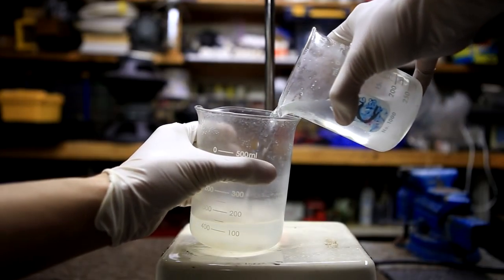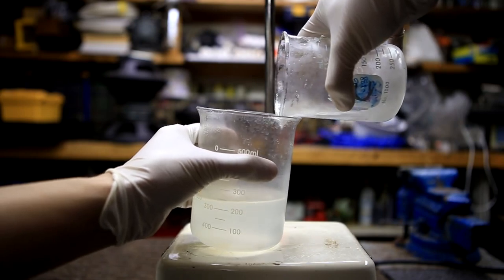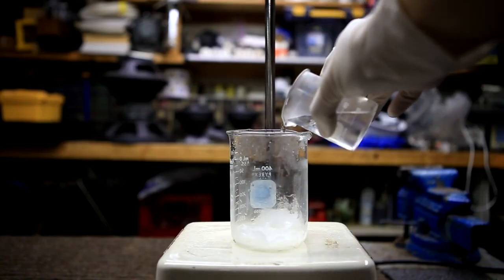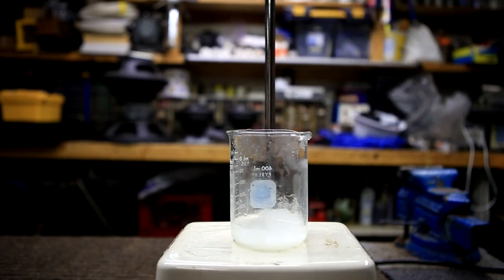The liquid portion was then decanted into another beaker and discarded. The crystals were then washed once using 20 milliliters of ice cold water.